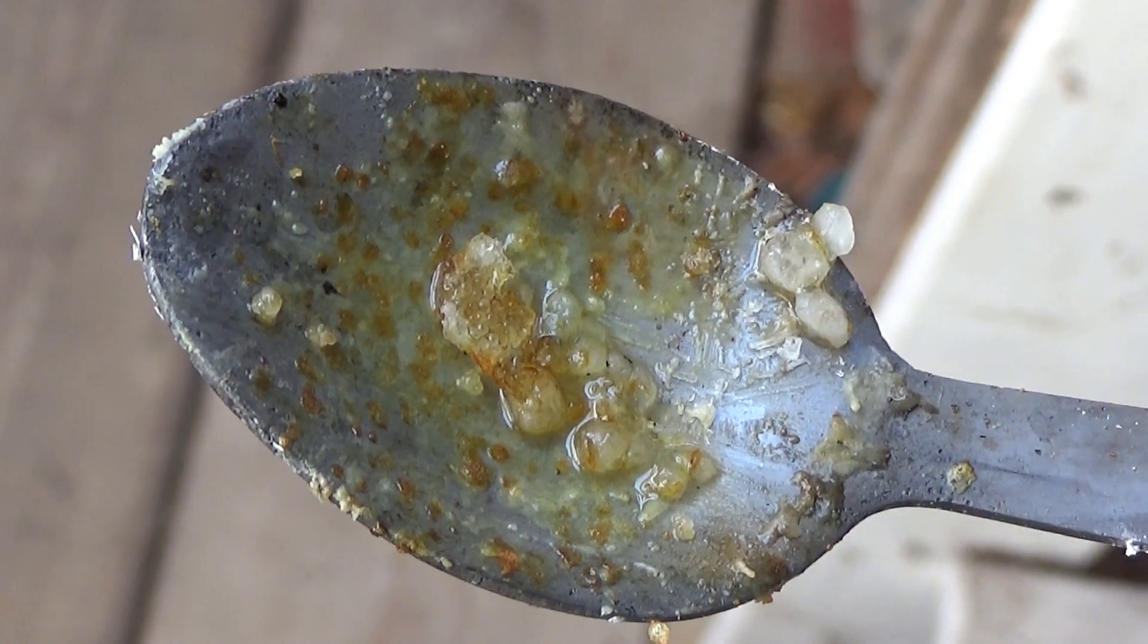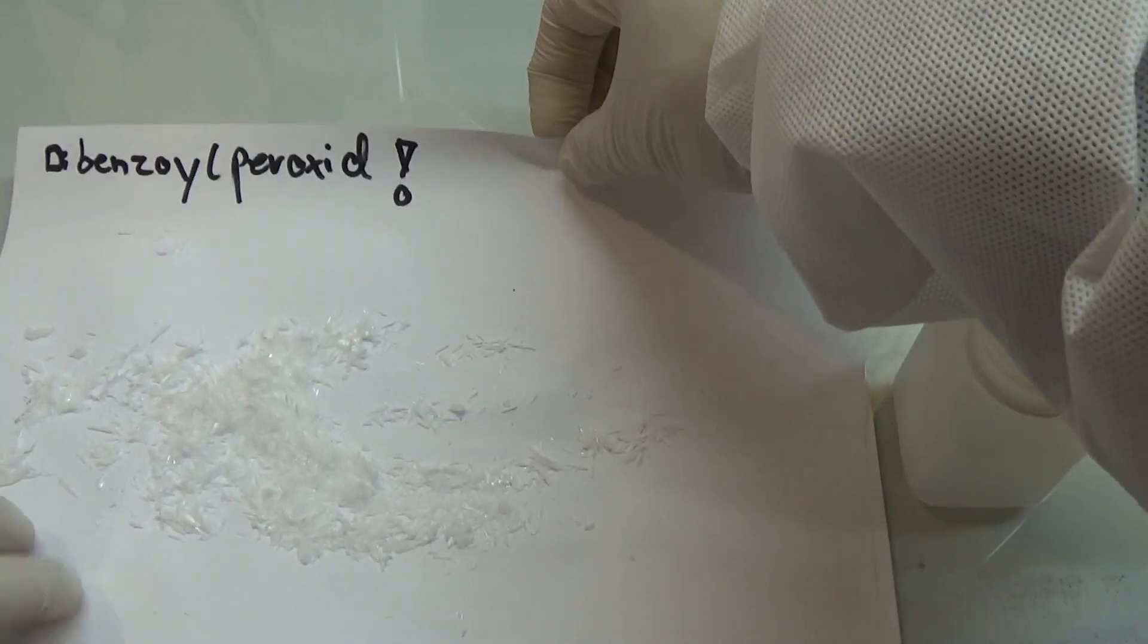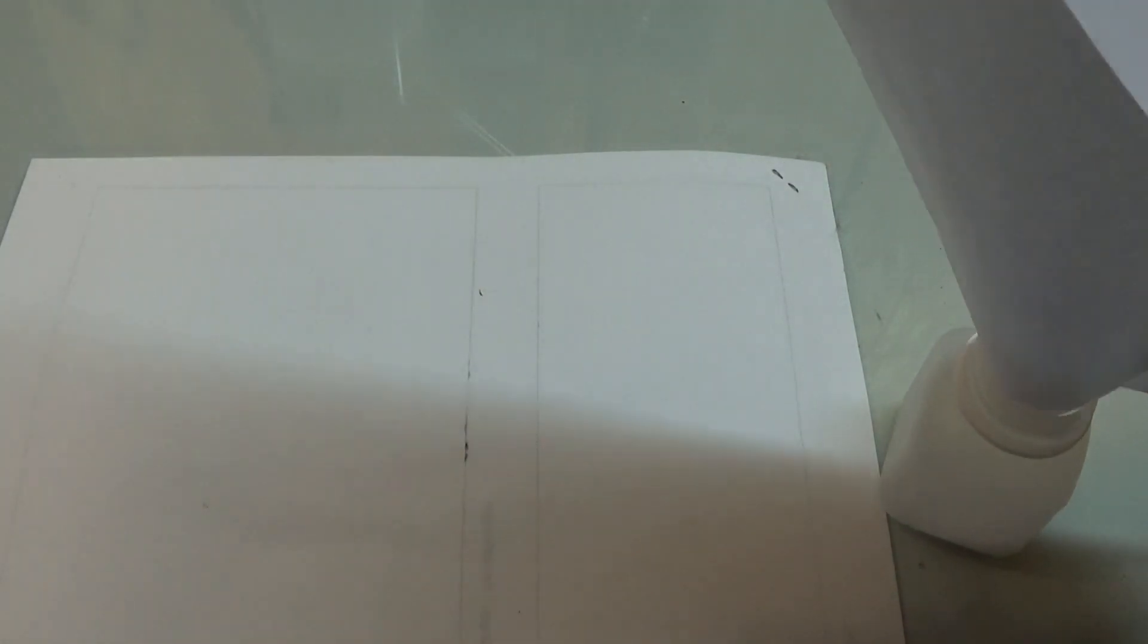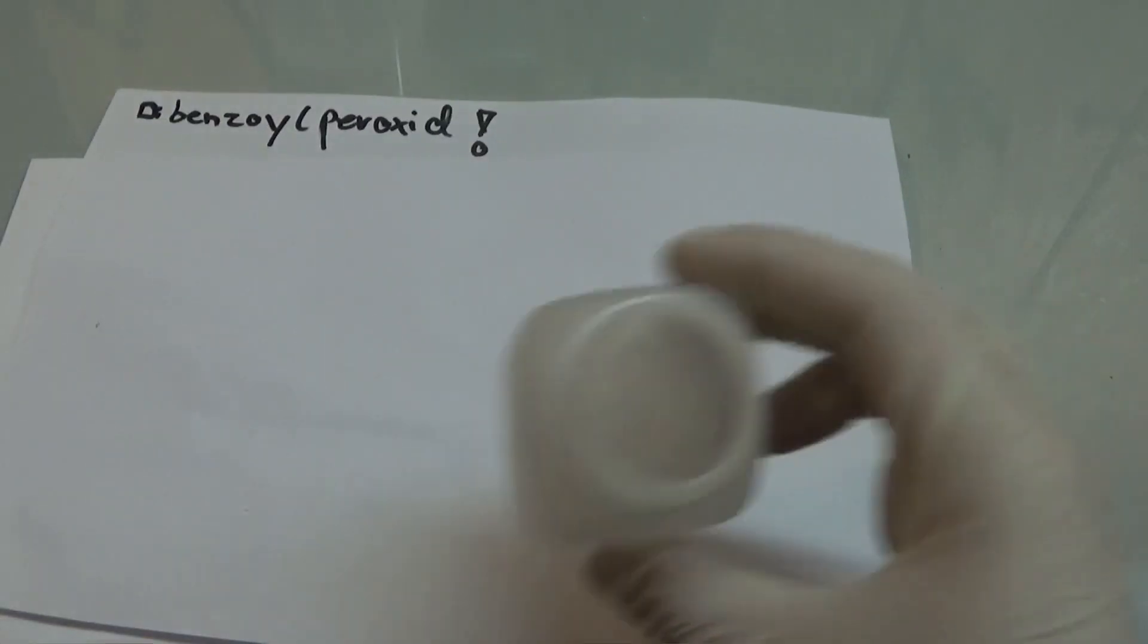So then now it's time to pack it and store it. But not for long. The styrene oxide synthesis will come soon. Then have fun and do not kill yourself.